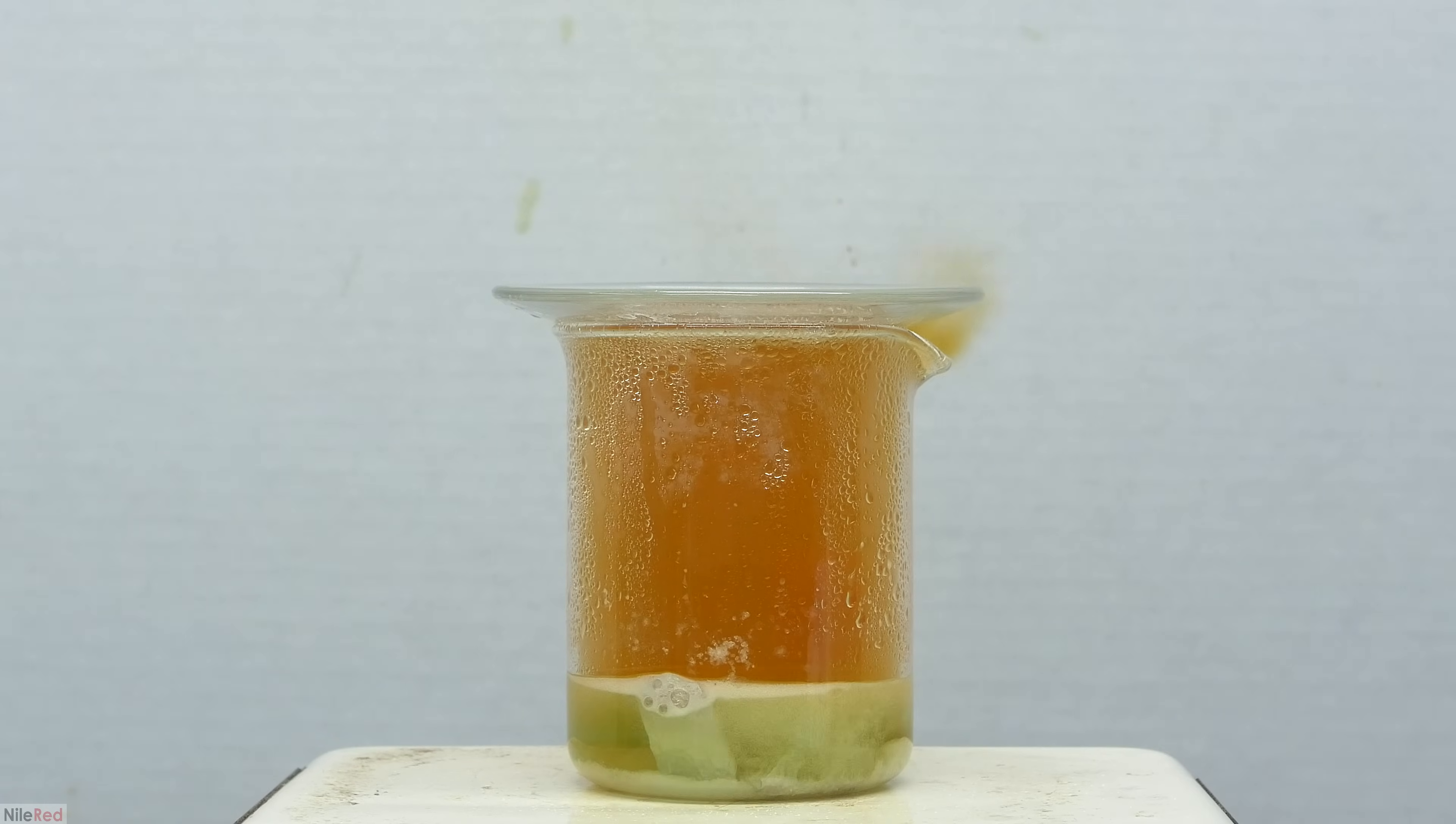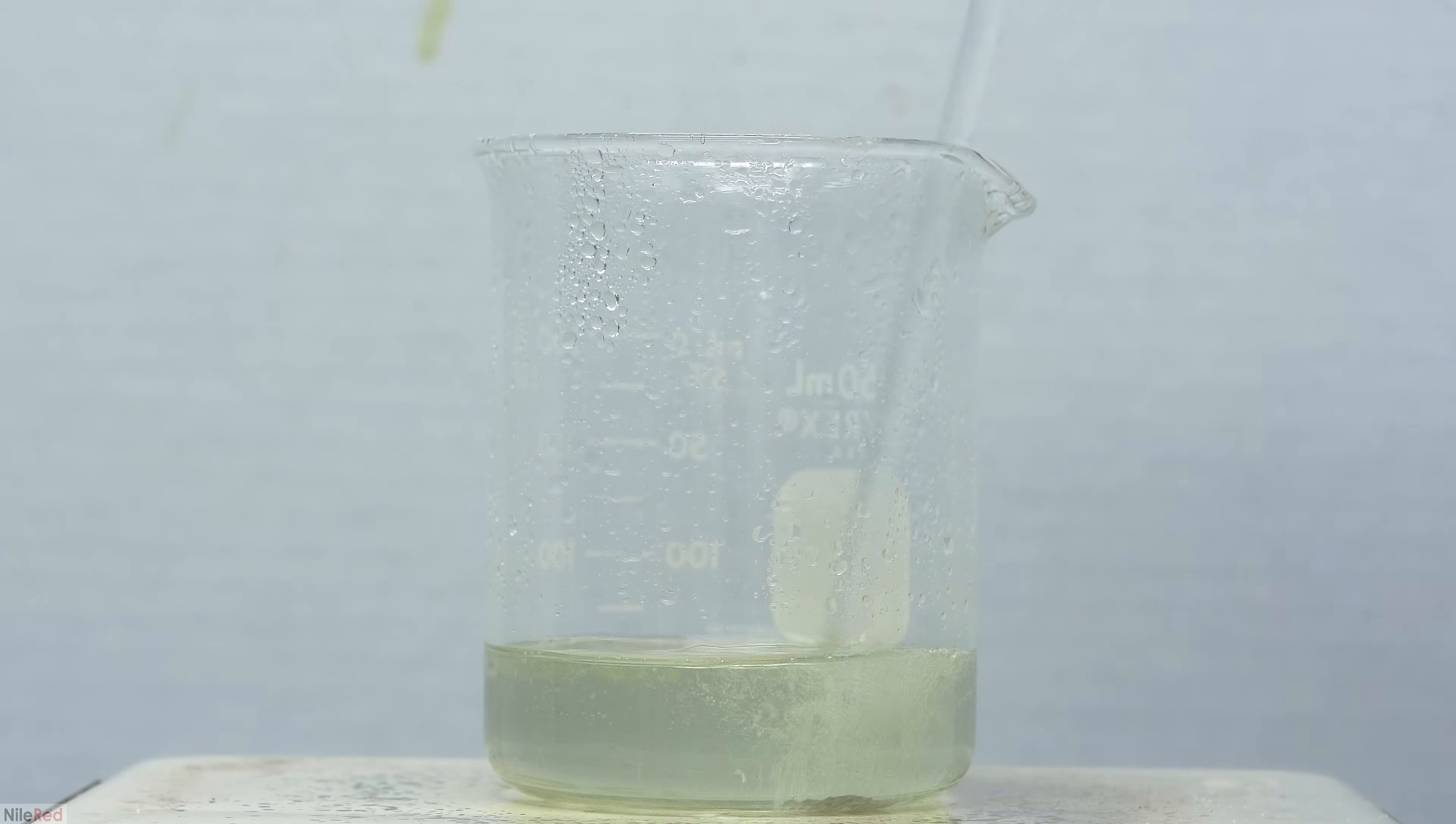As we get closer to the end, the solution becomes more colorless and the color of the nitrogen dioxide gas starts to fade. The most annoying part is when we're very close to the end and we have just some small pieces of silver left that seem to be taking forever to fully react.